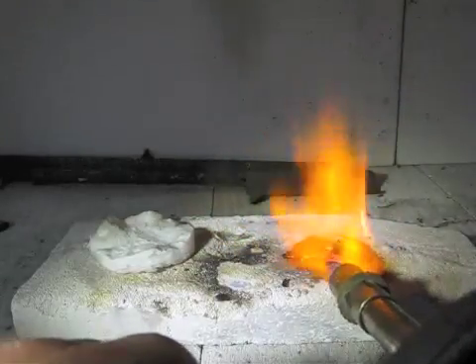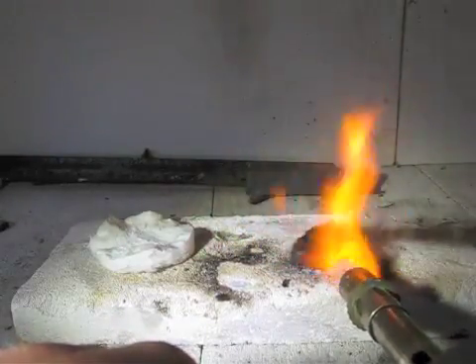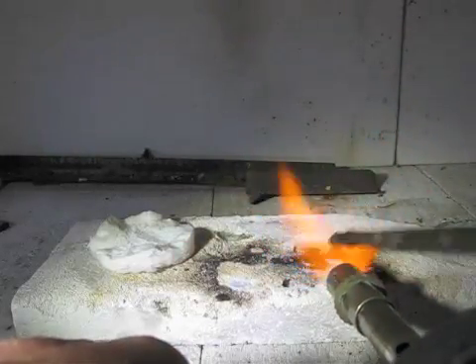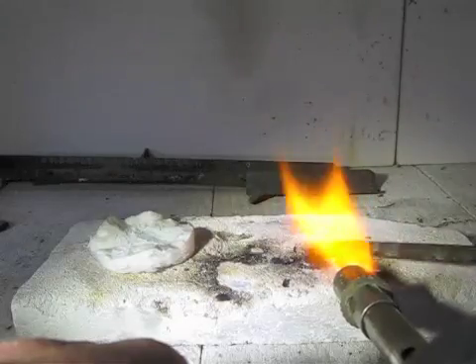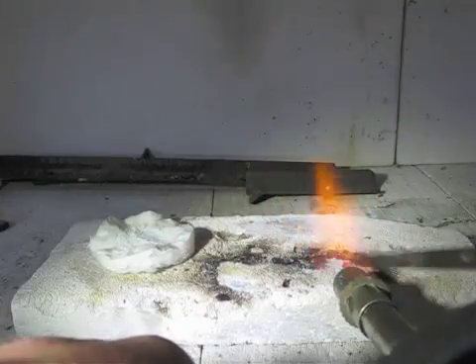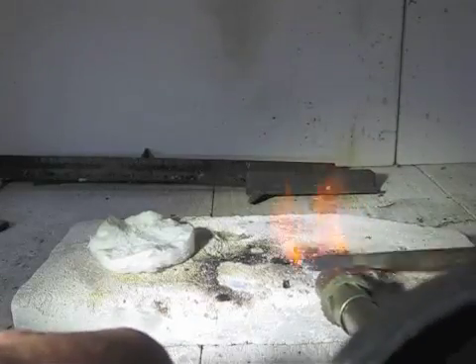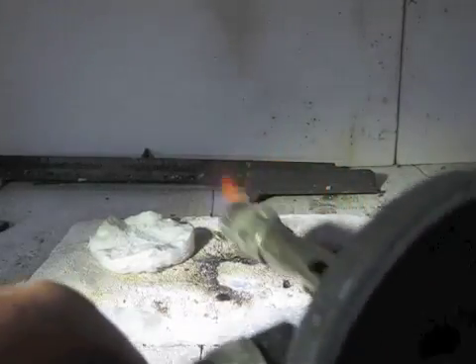It smokes a lot as you see, it smokes a lot of them away. It burns completely — even the carbon remains are oxidized by potassium nitrate. It completely oxidates, it completely disappears. Okay, now the other one, the chlorate one.